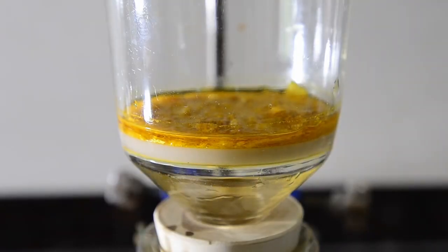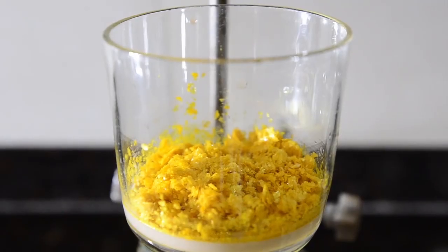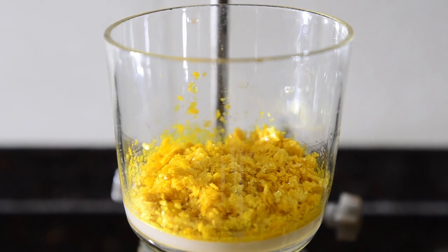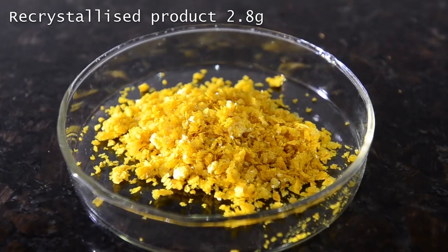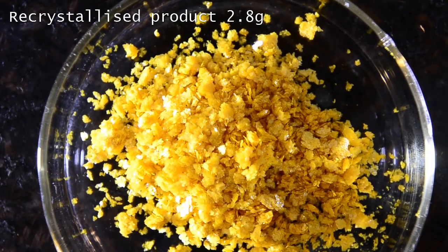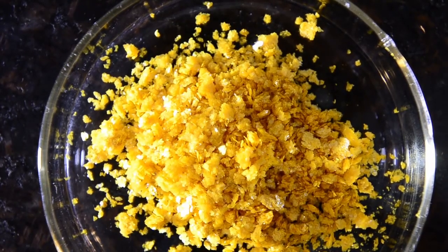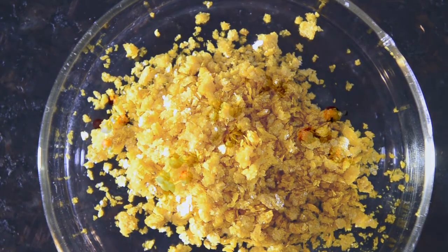These were filtered off and washed with 20 mL of cold water, then allowed to dry thoroughly on the pump. Here's our purified product: 2.8 grams of the vanillin-nitroethane condensation and elimination product. This compound is relatively unstable and you'll need to keep it in the freezer if you want to store it for more than a day or two. It decomposes readily in contact with warm water to produce red-colored decomposition products.